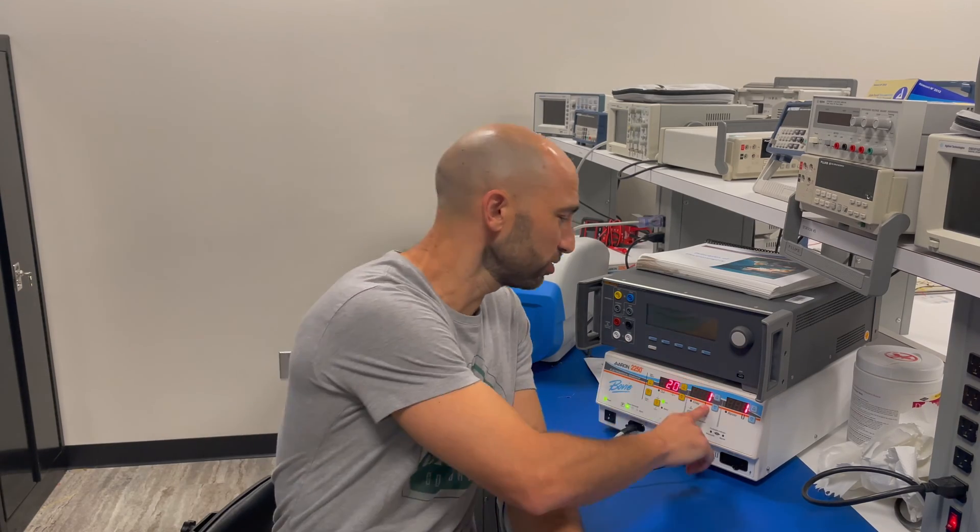Right now I am hooked up to this electrical surgical generator, and what I want to do is run electricity through my body and turn this light bulb on. Let's see how it goes.